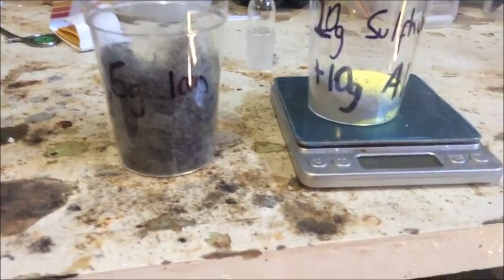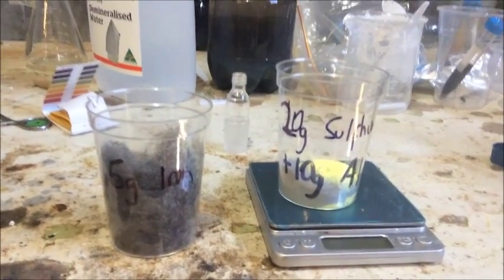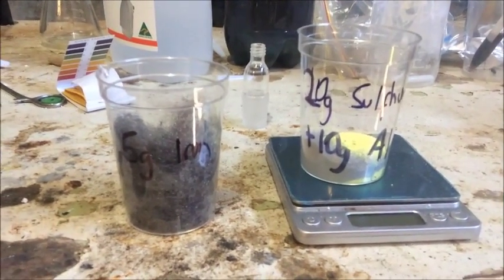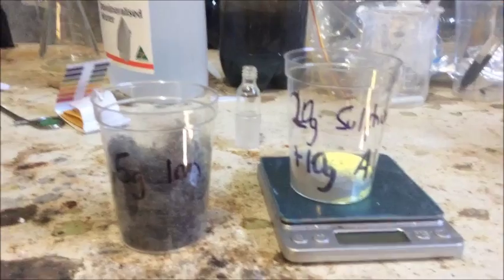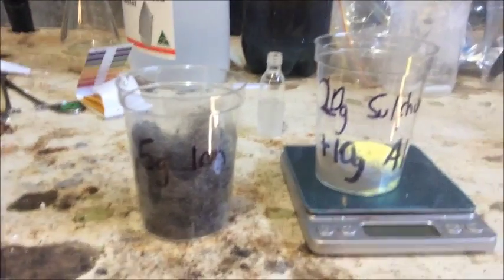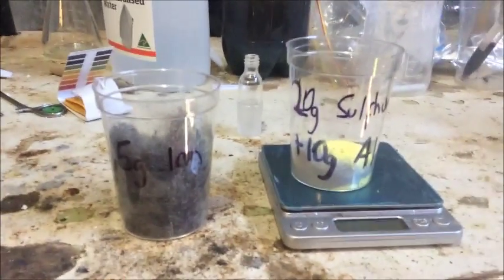We'll mix this — I'll use a glass container because aluminium will melt and that'll add extra slag and slow the reaction down. The glass thing will shatter but that's okay, I'll just use a disposable glass container — and then we'll go light this on fire.